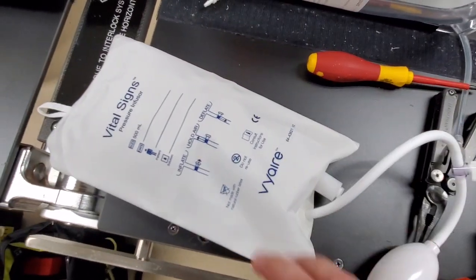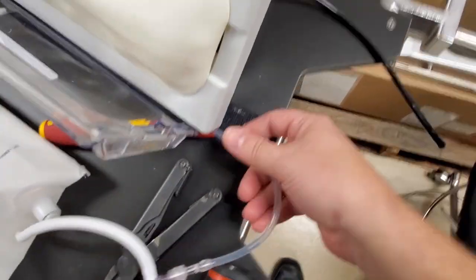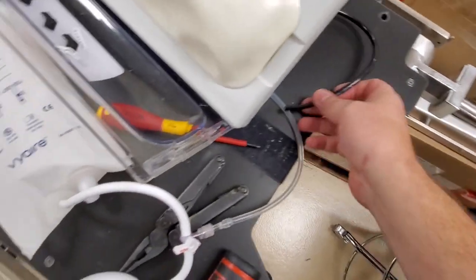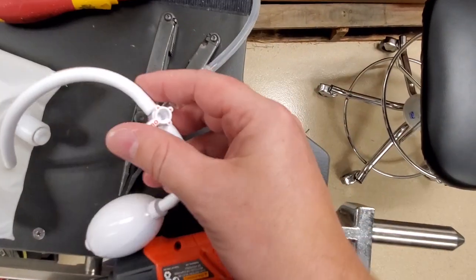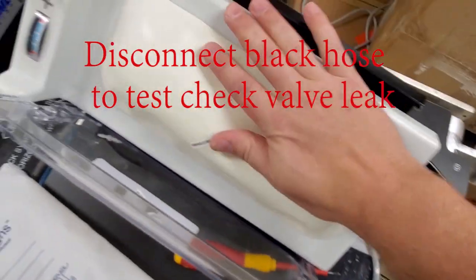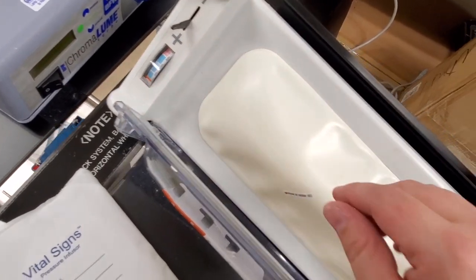This is a Vital Signs pressure bag that they use in anesthesia and all I do is Y in a piece of tubing which will connect here, pump up the pressure on this guy and then you'll go ahead and shut it off here. So you shut it off and isolate the reservoir and just take a look. And you can watch the bleed down based on how fast it is, that's how fast your leak is.